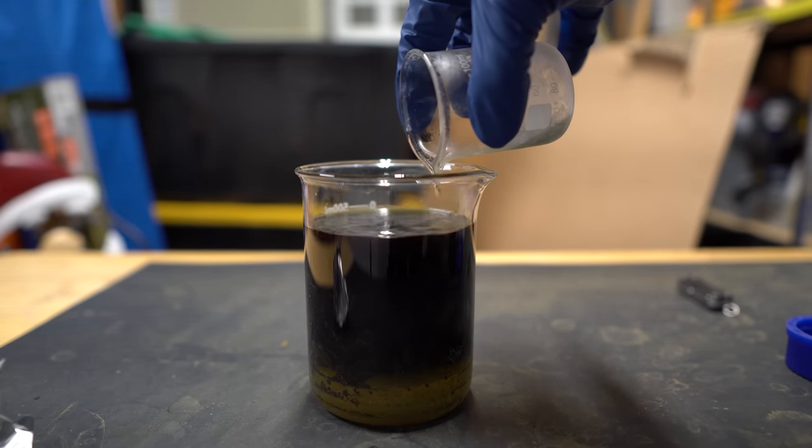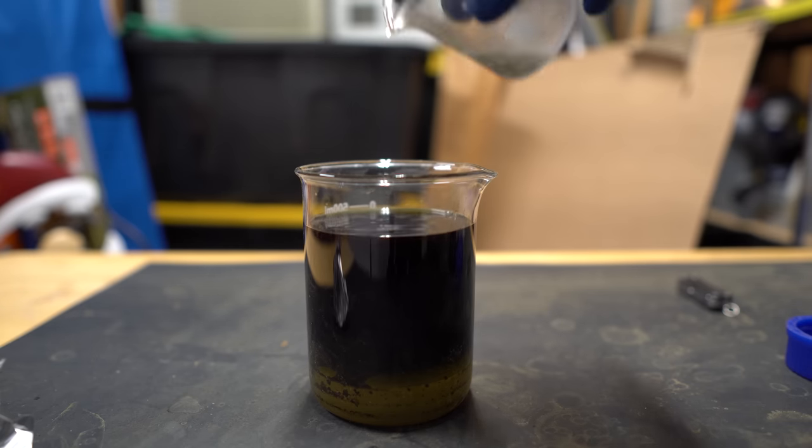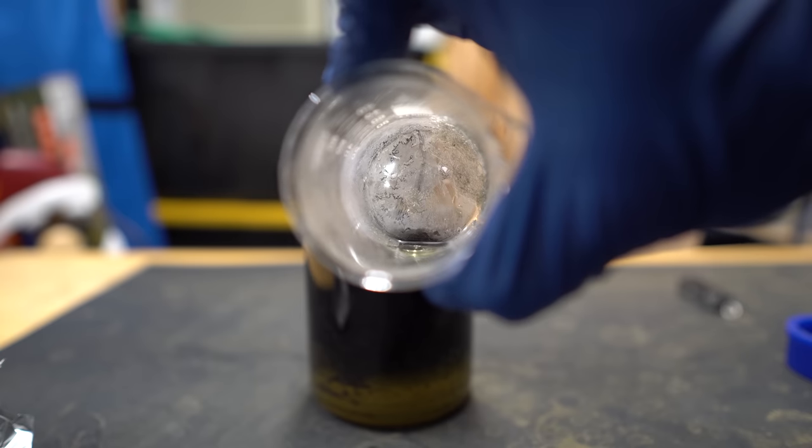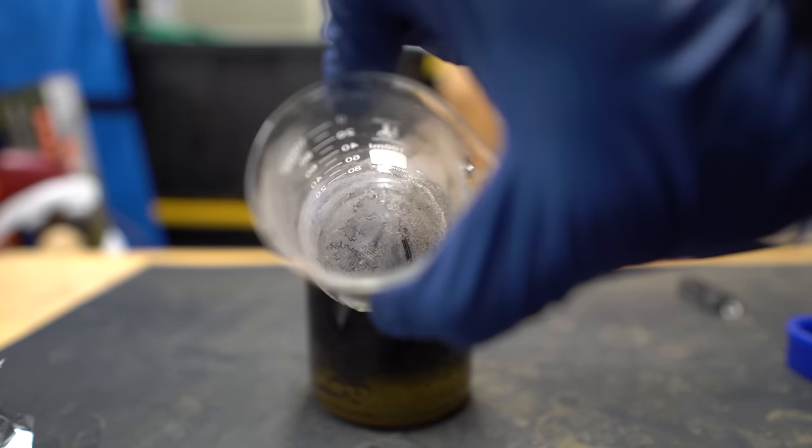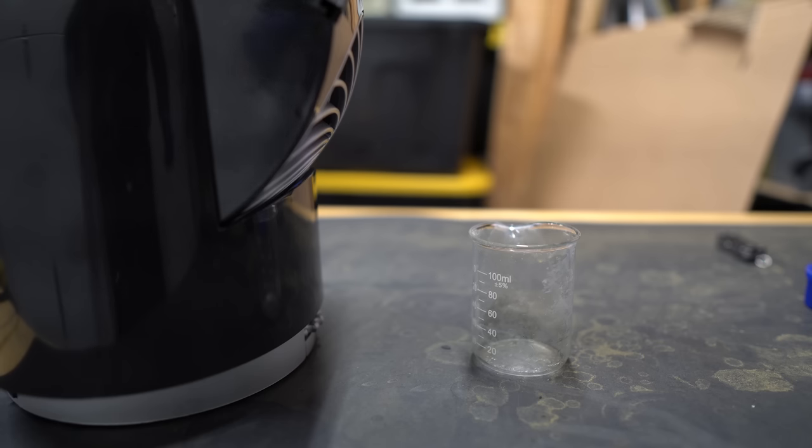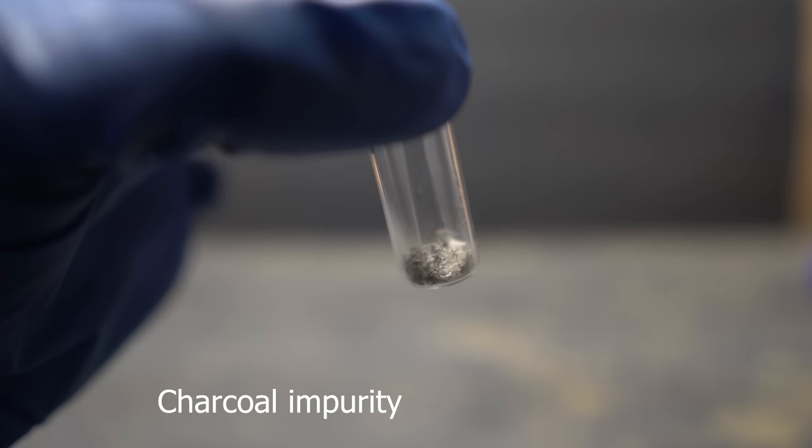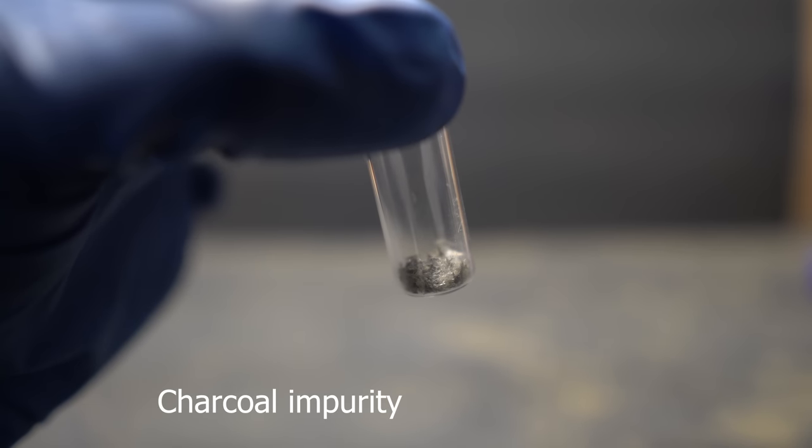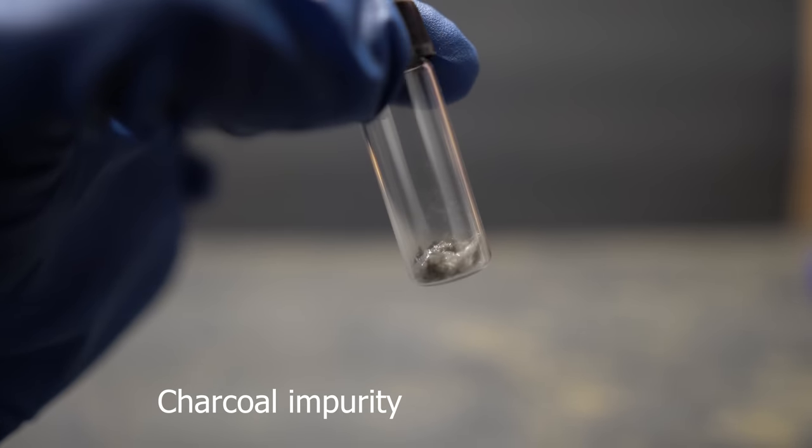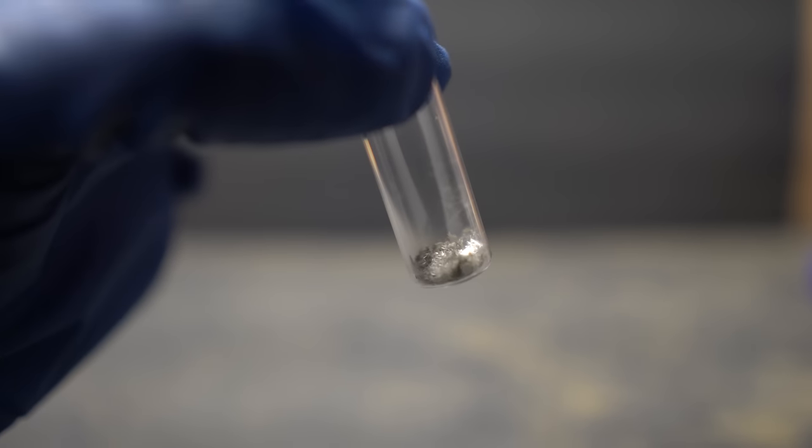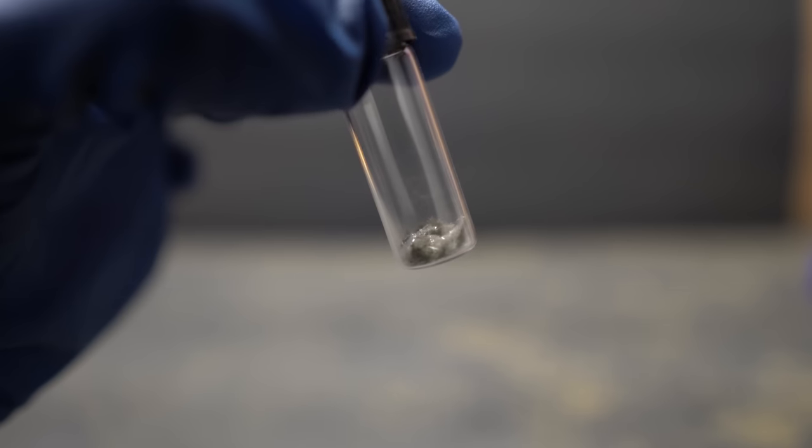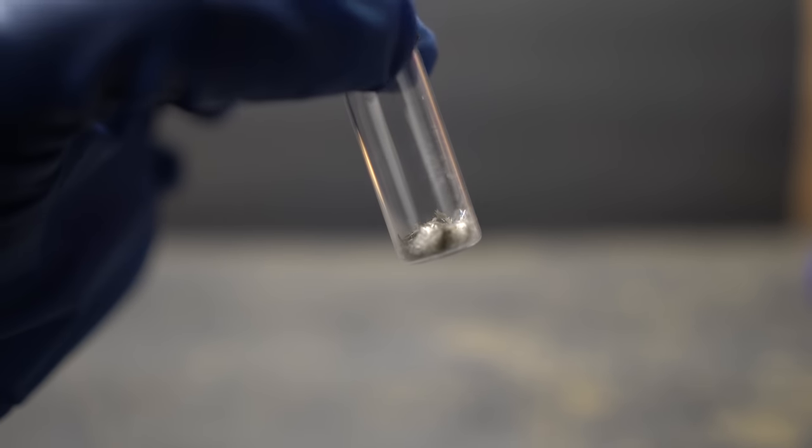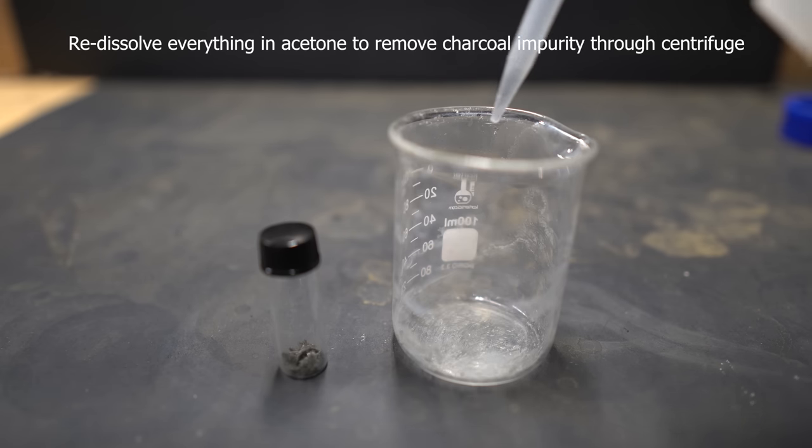The problem that I had with my recrystallization was there was some slight activated charcoal impurities in there. These latched onto the crystals during the recrystallization process and it made my crystals look black. I was extremely excited when I saw the crystals in the solution because I couldn't see the charcoal. When I dried everything and put it into this vial, you can really see the charcoal impurities. Apparently the centrifuge did not get it at all.